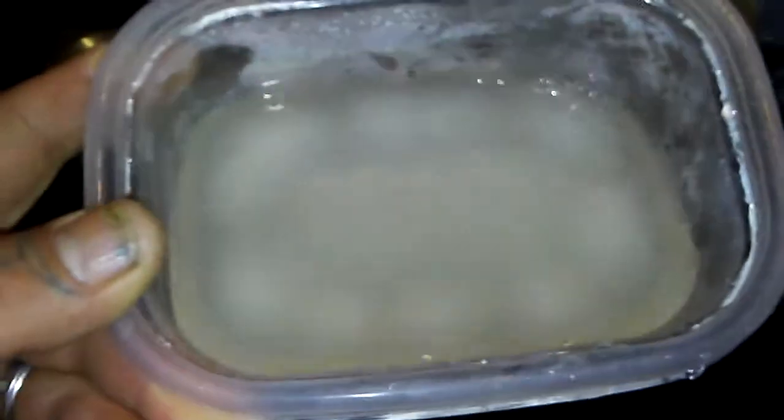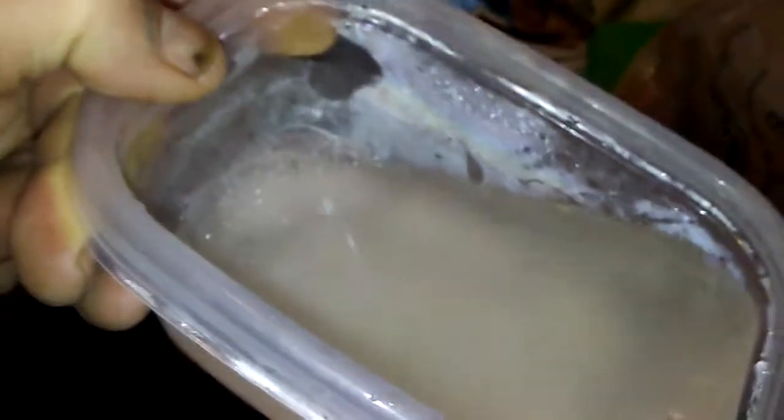It's been in the freezer for about 40 minutes and you can see that it's starting to crystallize — precipitating out and crystallizing on the bottom. I'm actually hoping for about three times more than this, so I'm going to leave it sit for a while.